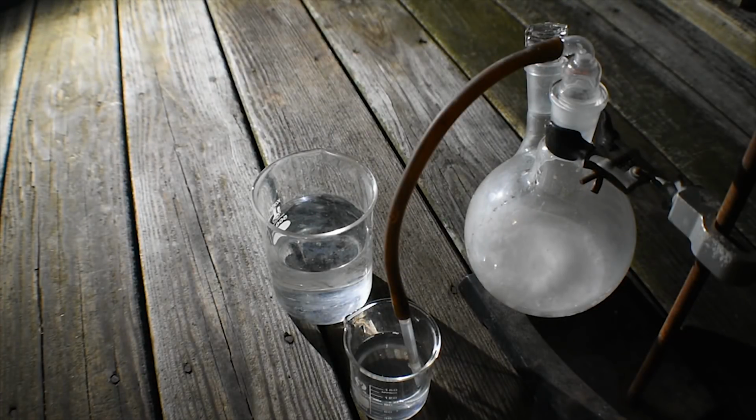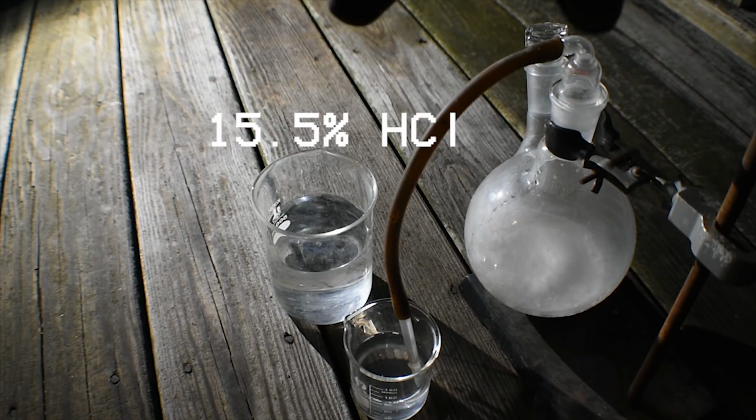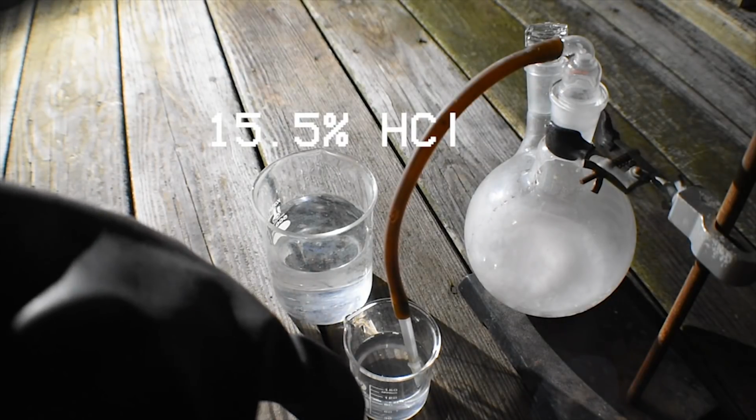Now that I'm outside and have a decent source of ventilation, being the wind, I can go ahead and start the reaction. In the larger beaker, sort of off to the left, I have some 50% by weight water and 50% 31.45% hydrochloric acid, which makes about a 15%, maybe even 15.5% solution of hydrochloric acid. I'm going to add this to the chlorine generator, which will then begin to generate chlorine gas, which is going to be led through this tube and into this potassium thiocyanate solution.